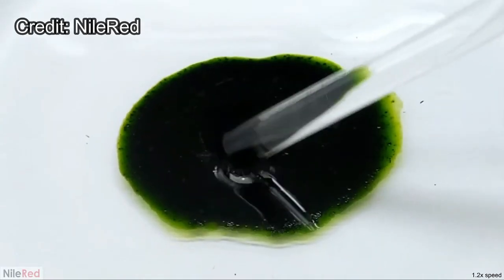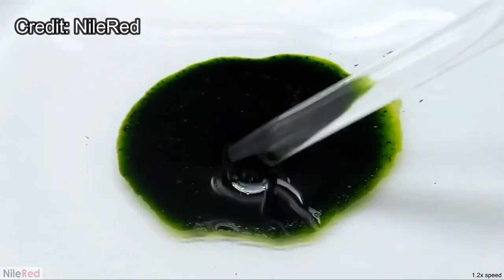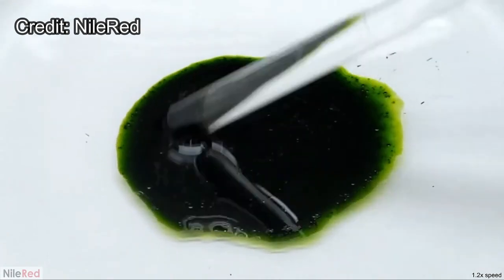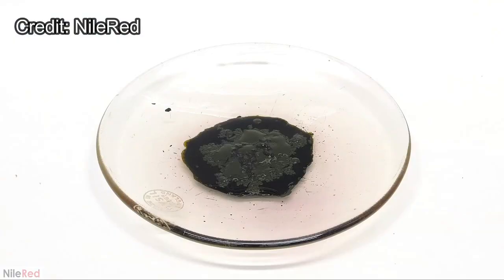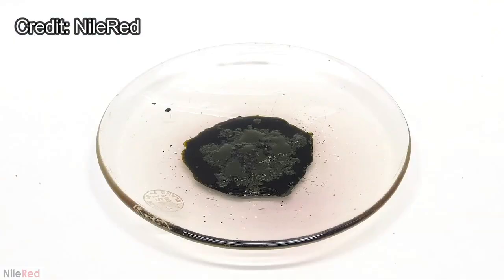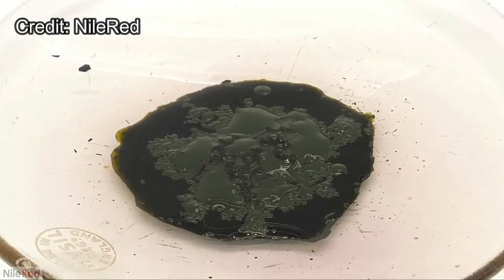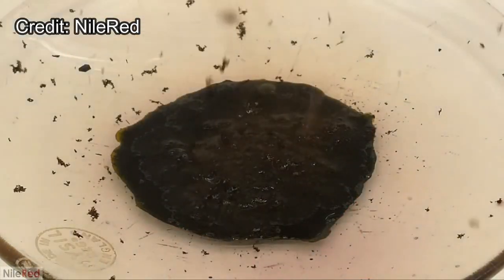It's very unstable and powerful, and we can see that in this clip — it reacts with basically everything organic. We will try some things later. So let's make some manganese heptoxide.